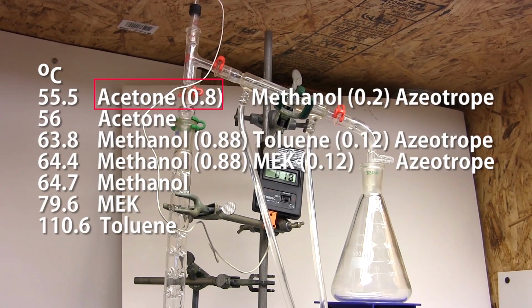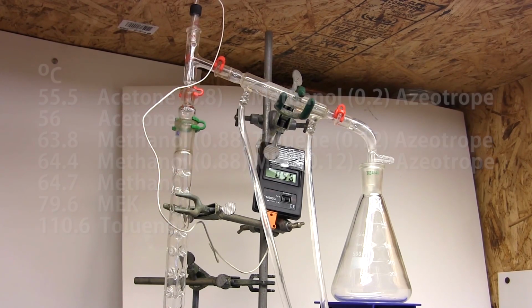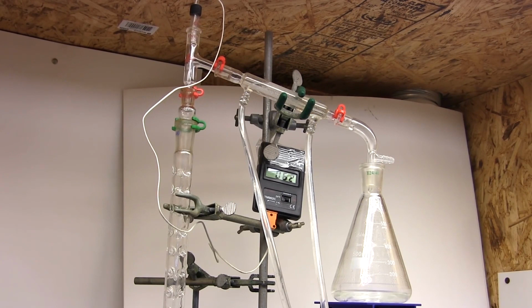We can see that the acetone and acetone-methanol azeotrope boil at around 56 to 55 degrees Celsius, while the next cluster of compounds boils around 64 degrees Celsius. So if we're condensing near 55 degrees, then we know we have acetone azeotropes. But if we go past that into the 64 degree range before we condense, then we know we have no acetone. Looks like we're getting a nice fraction of methanol azeotropes.